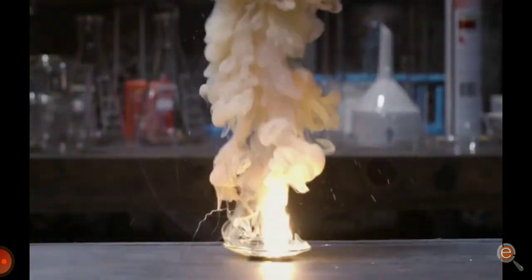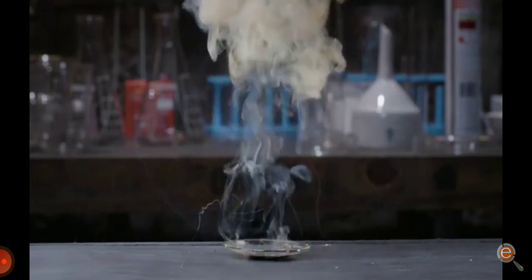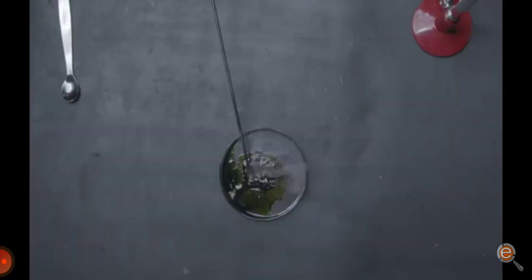Though a good oxidizer, manganese heptoxide is highly unstable, trust me. So it's always looking for any reason to decompose by either reacting with something or spontaneously by itself. Now that we have it in front of us, let's touch the top layer with a metal rod.